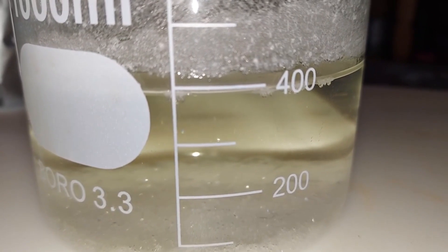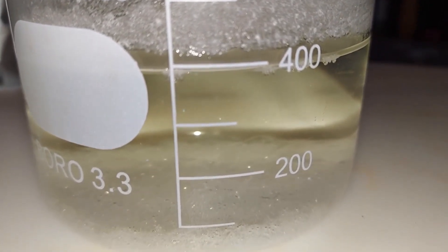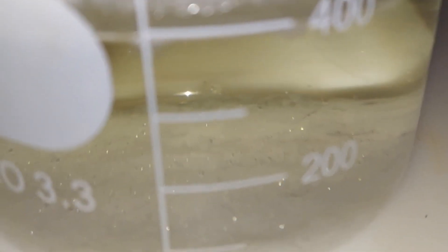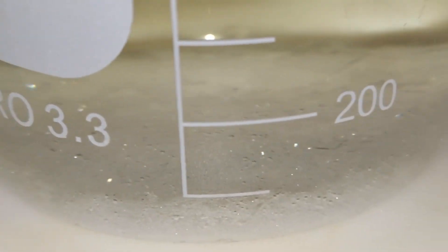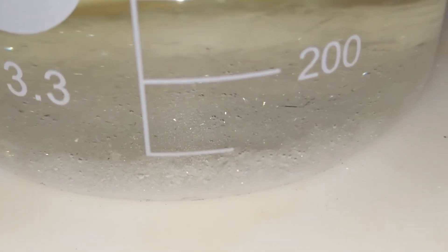But on the bottom here you can clearly see some beautiful sodium chloride crystals that have formed. Yep, table salt down there. Because it cooled down on its own, it formed more salt than I was hoping for.